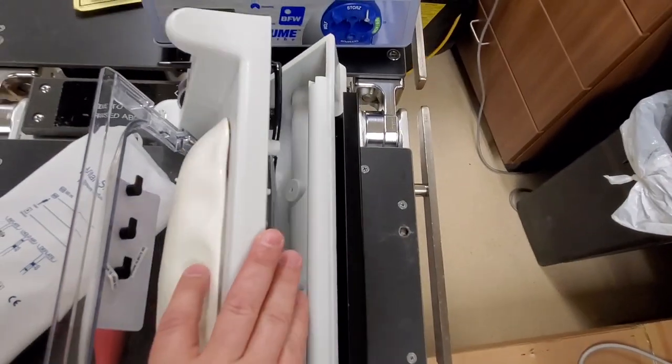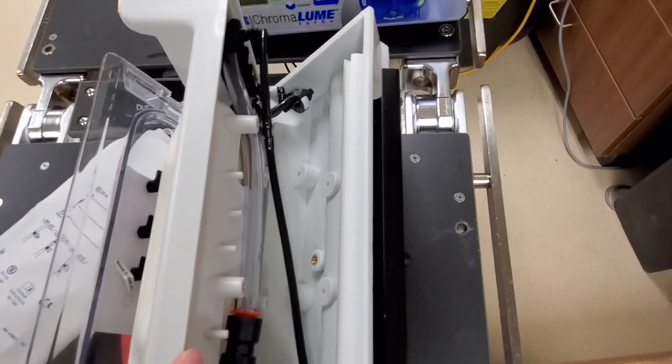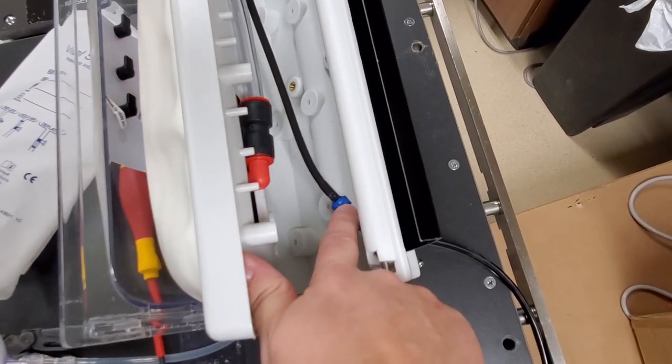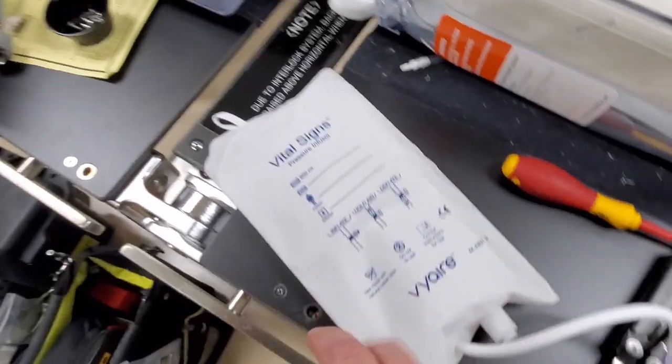So in case it goes over 300 millimeters of mercury, this guy here will vent to atmosphere just naturally, spring pressure. So a couple of things that I've had to do in these guys before is you can test your check valve and you do that simply, you guys have seen me, I've done videos on these guys before.